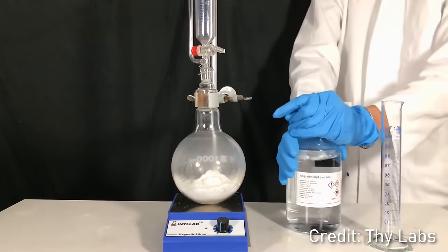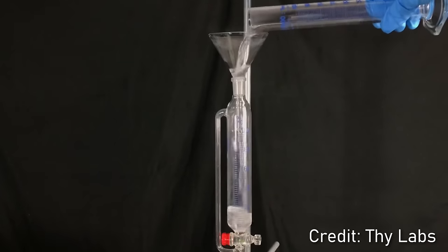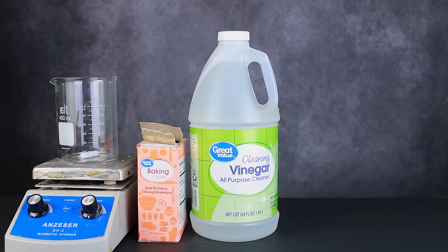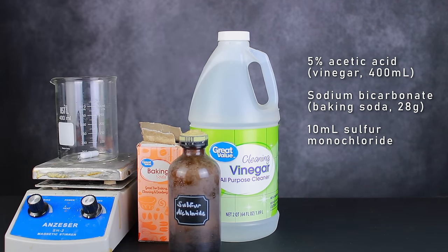Acetic anhydride can be synthesized in a number of ways, but most of the pathways require inaccessible reagents like acetyl chloride or dangerous setups like a ketene lamp. The pathway I'll be sharing, however, is highly accessible and not excessively risky, requiring only vinegar, baking soda, and a healthy dose of nasty sulfur chlorides.